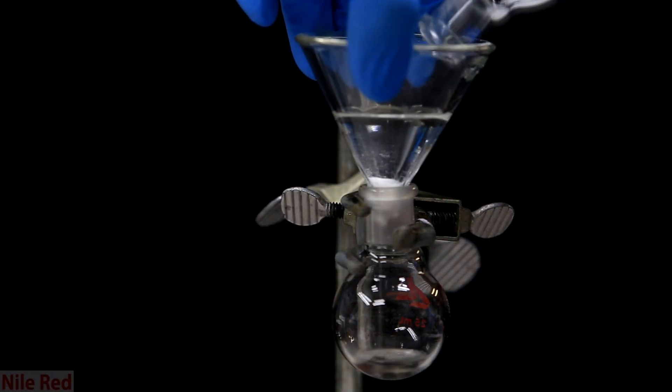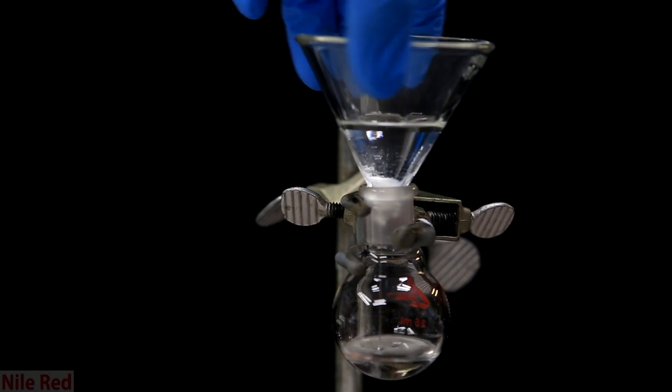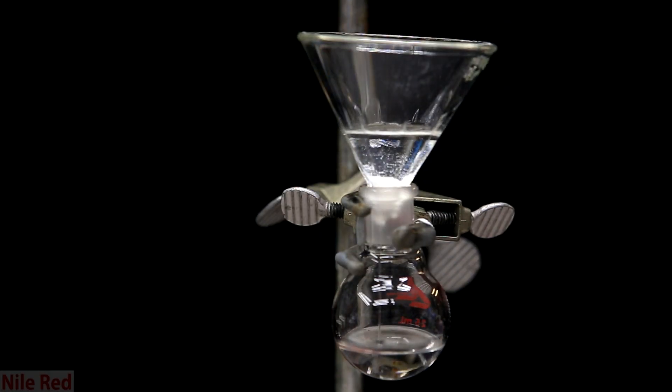Generally it's really not super accurate but when we feel it's pretty dry, it's then filtered through a small little bit of cotton into another clean round bottom flask.